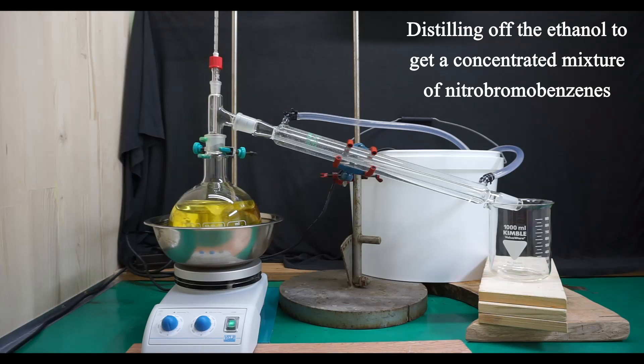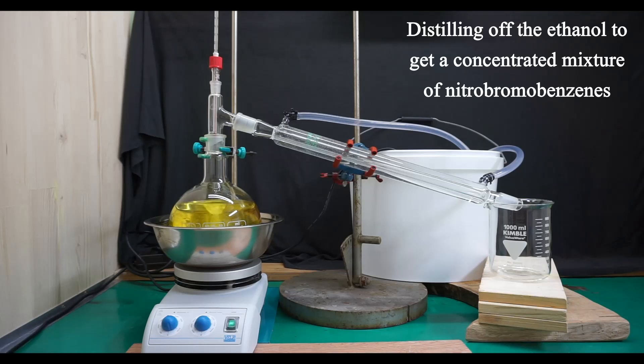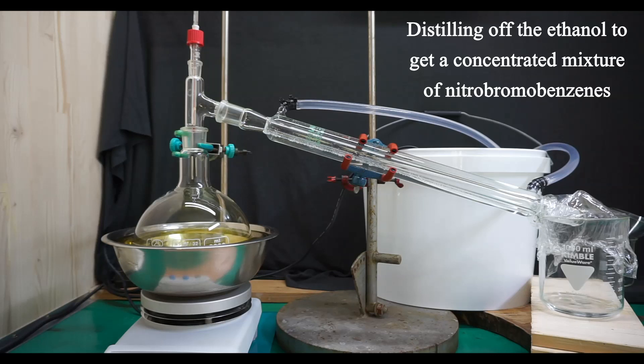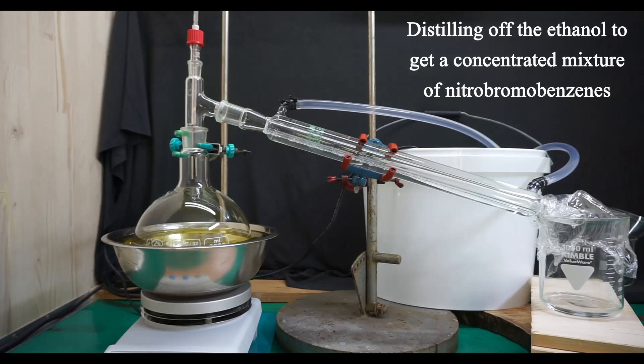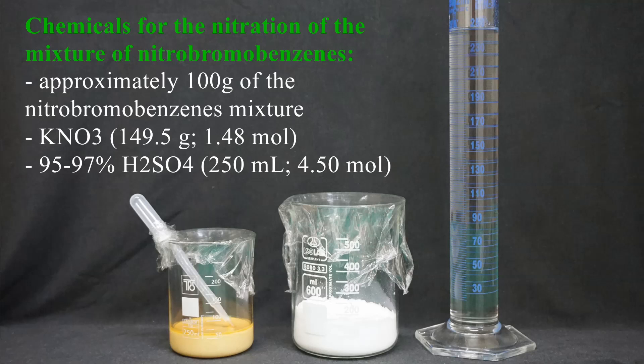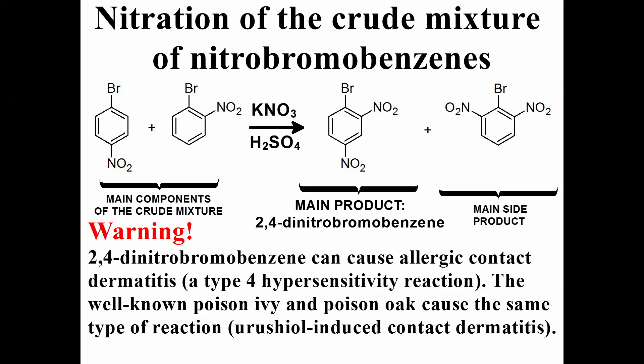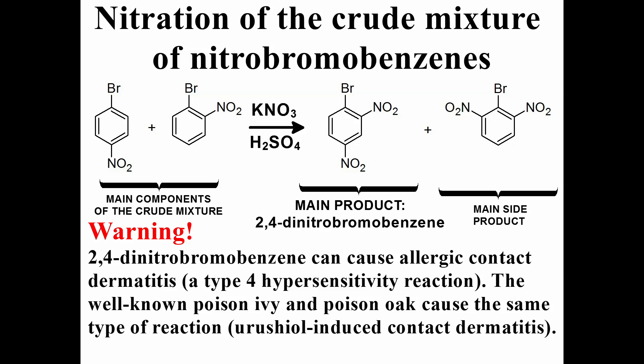I don't like throwing things away when they can still be used, so I gathered all the filtrates and the oily mixture I got at the beginning after the filtration of the quench reaction mixture. I put everything into a 2-liter reaction flask and distilled off the ethanol. I was left with a crude mixture of nitrobromobenzene weighing approximately 100 grams and I used this for the preparation of 2,4-dinitrobromobenzene. I followed the procedure described on Science Madness by user UnintentionalChaos — the link is in the video description. The main difference is that he used pure bromobenzene as the starting material and I used my crude mixture of mostly mononitrobromobenzenes.